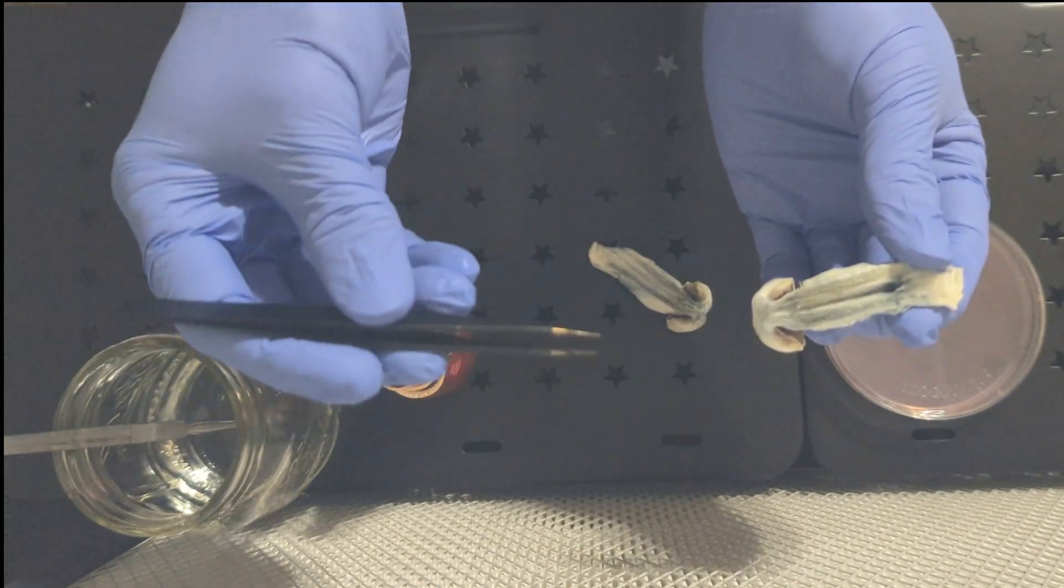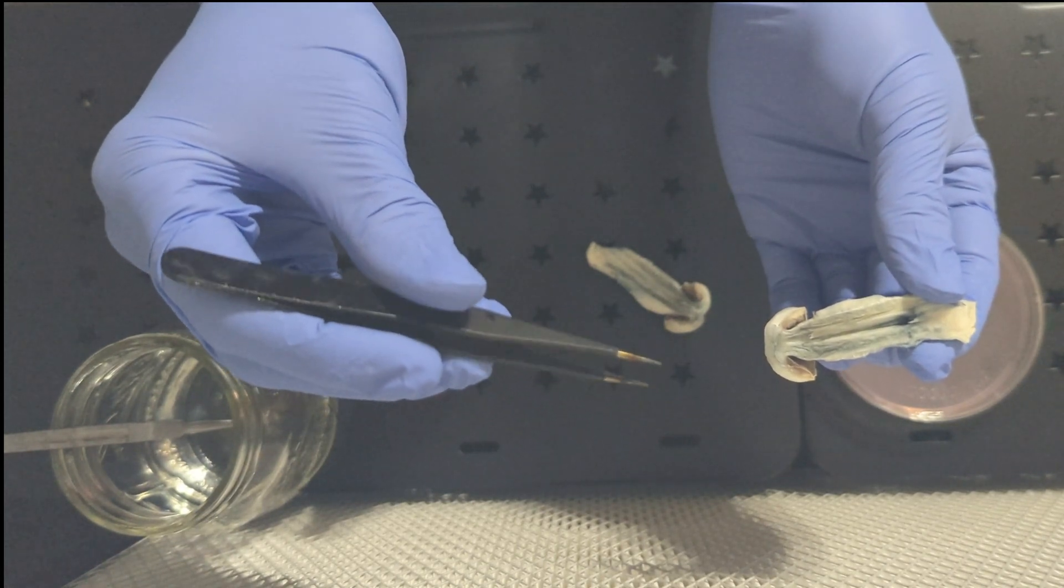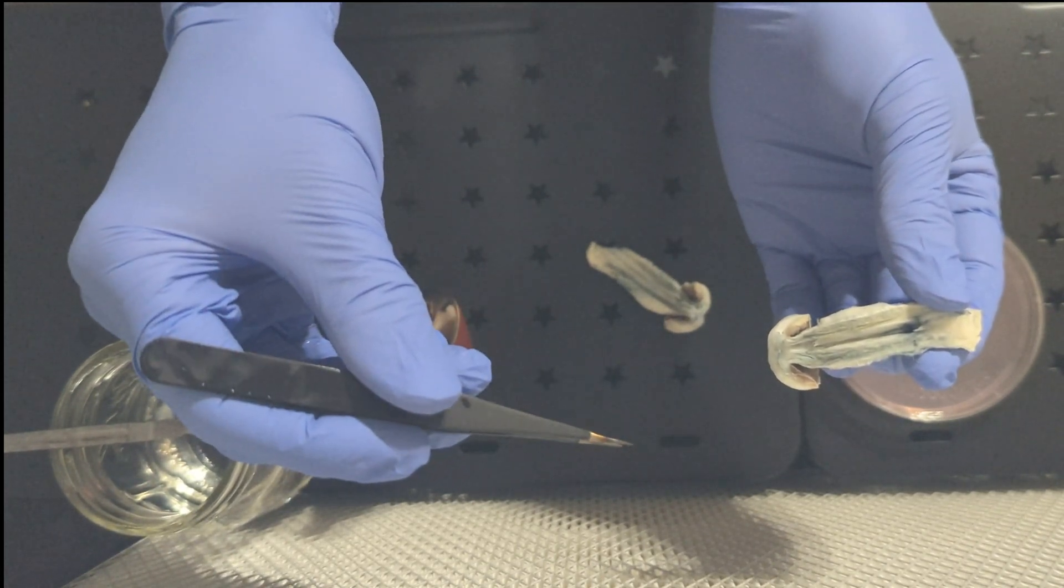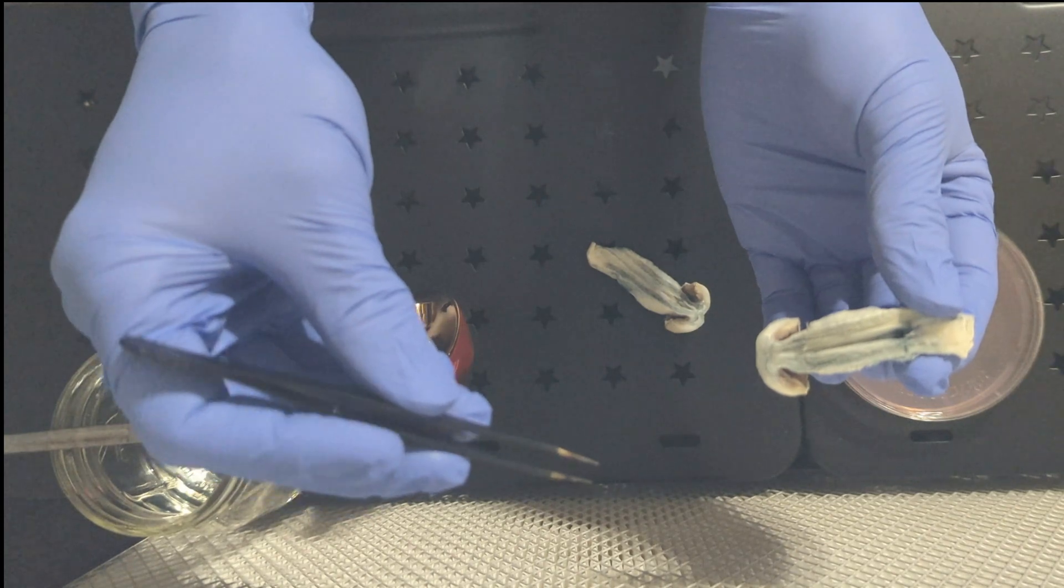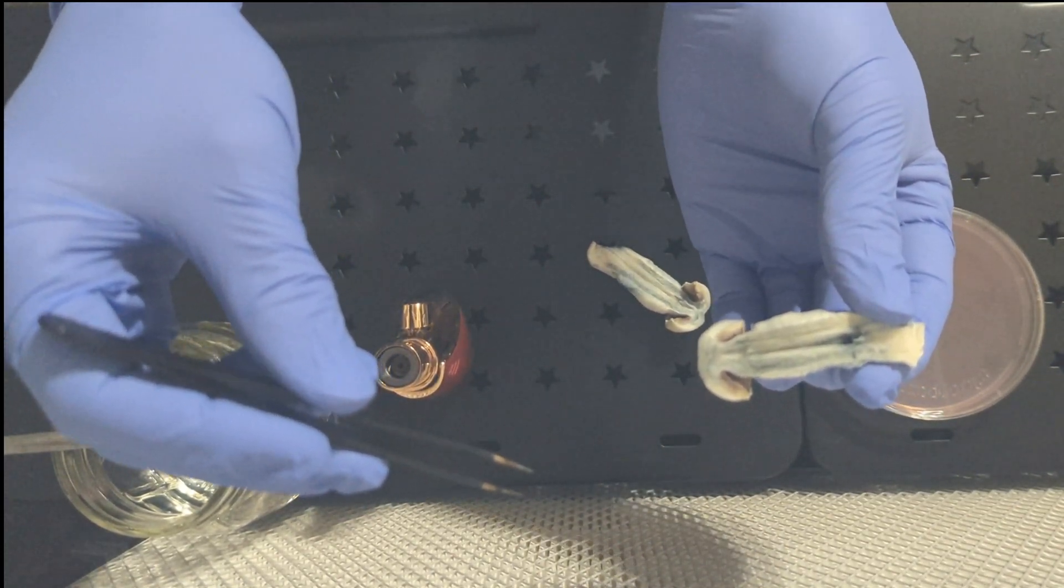Flushes where pins will all start and finish at different times and be different sizes, or even totally different expressions. This is where cloning comes in and becomes very useful. You can select genetics to regrow by picking the best mushroom from your grow.